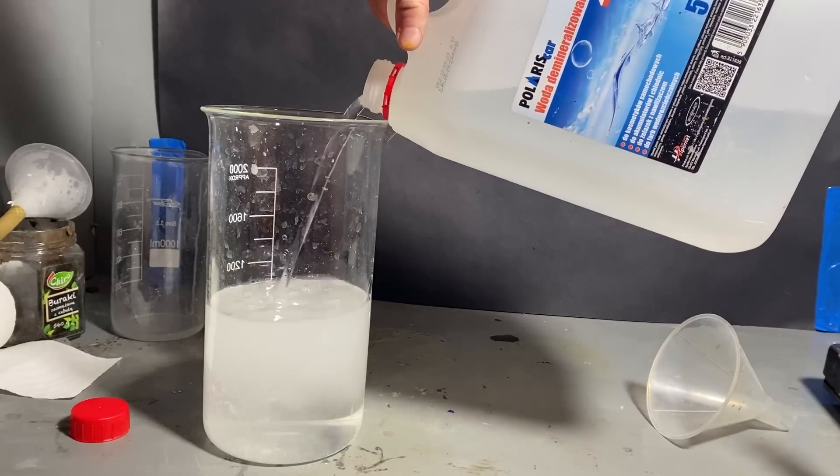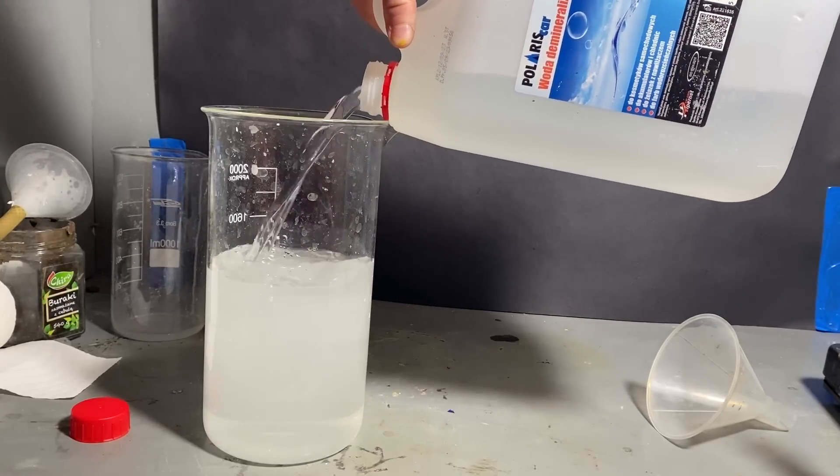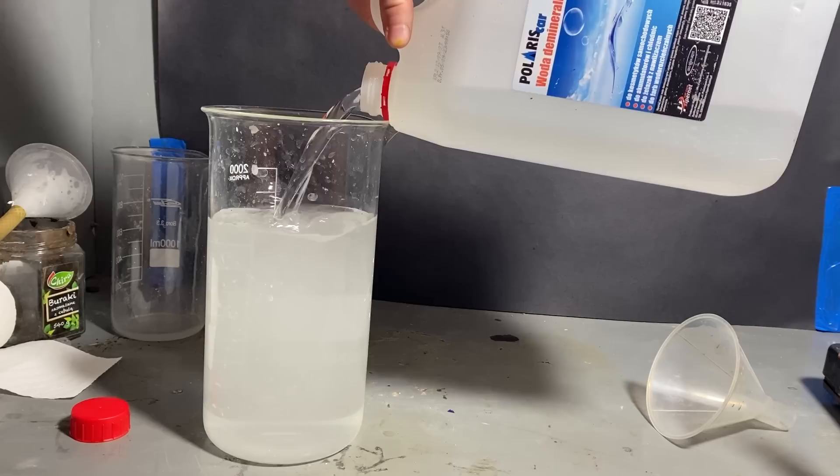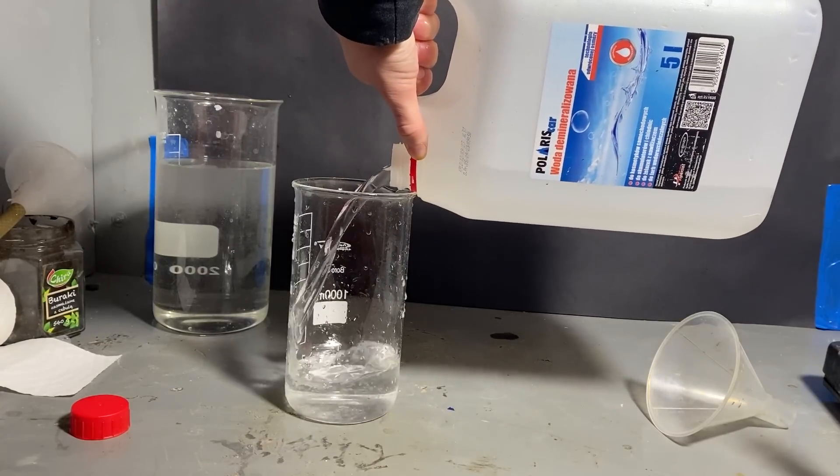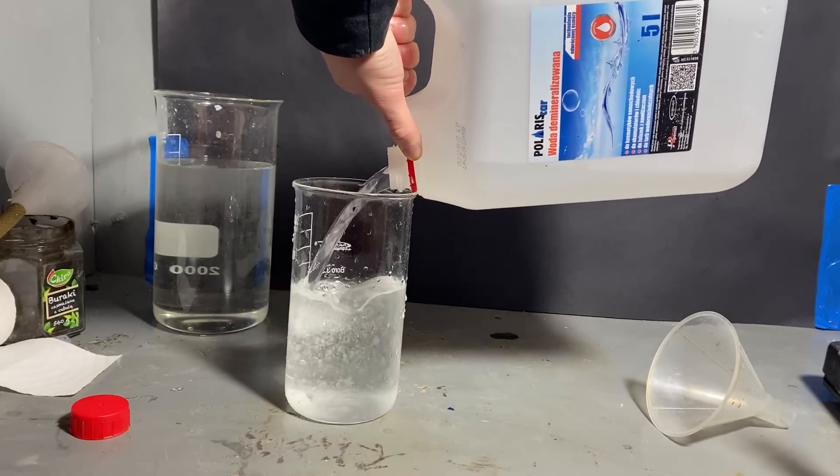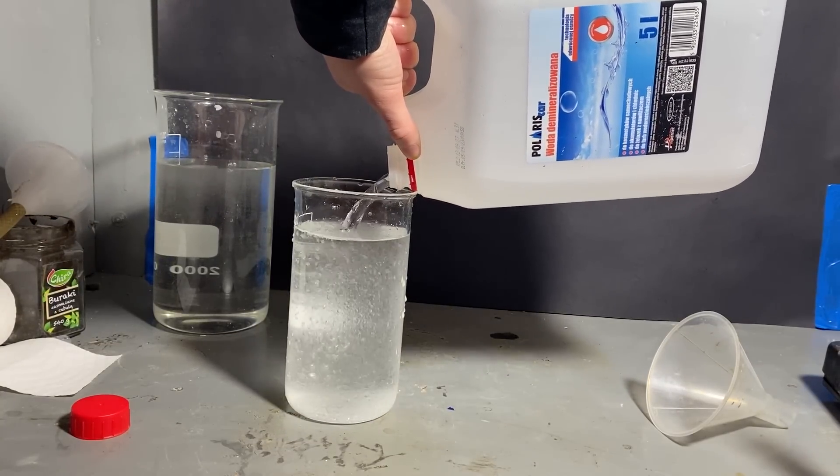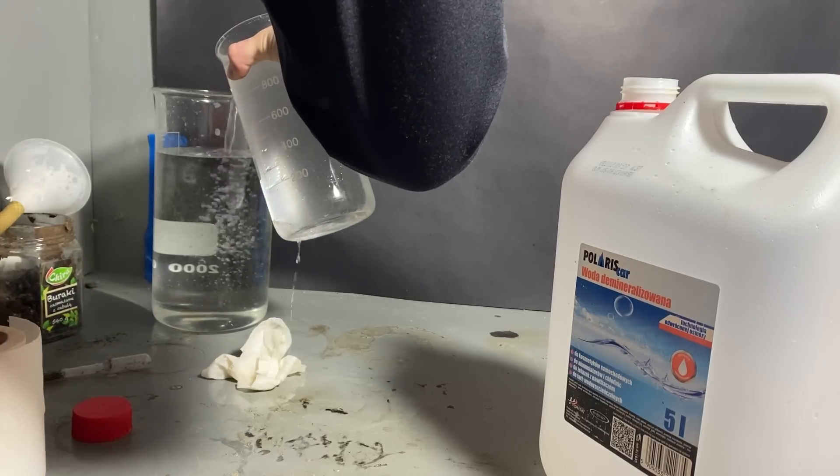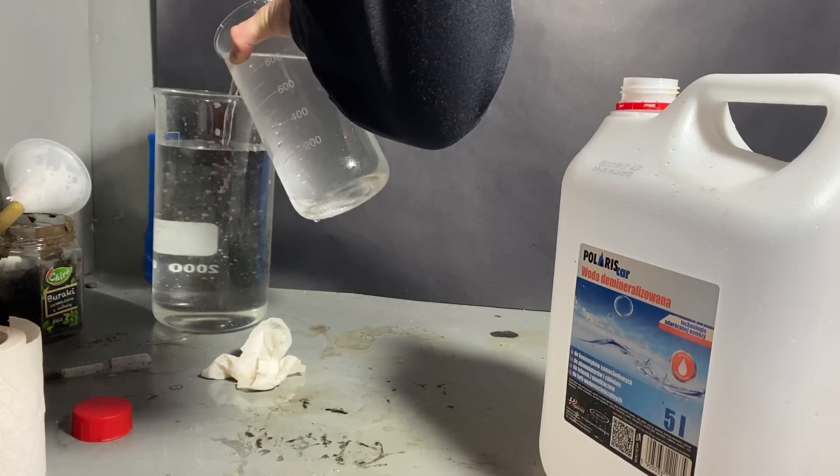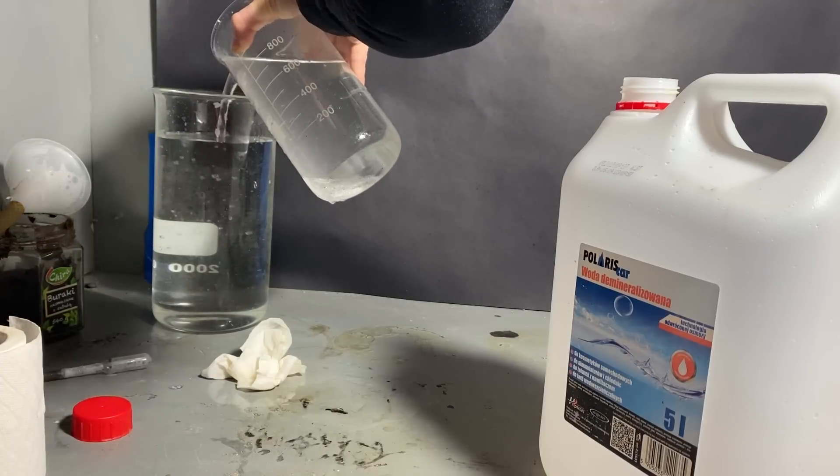This water most likely had around 20 grams of chloroform dissolved into it, but I'm not going to go through the hassle of recovering it. In fact, I think it's actually impossible to do so. If there were to be chloroform, then it would be at the bottom of the container, because chloroform's density is much higher than that of water. This oily layer at the bottom is basically the chloroform, and now I have to use my separatory funnel to get a fine separation of the chloroform and water.